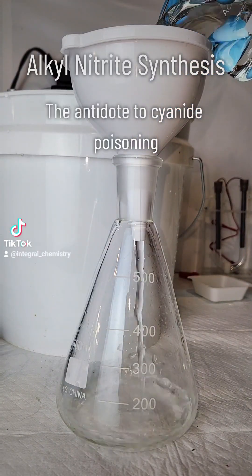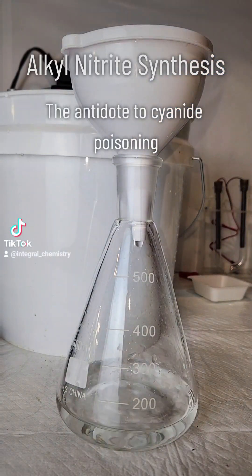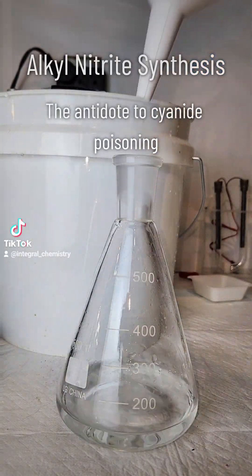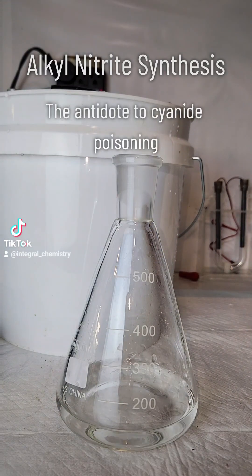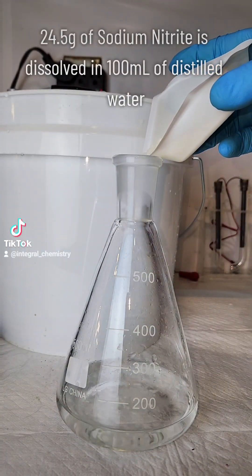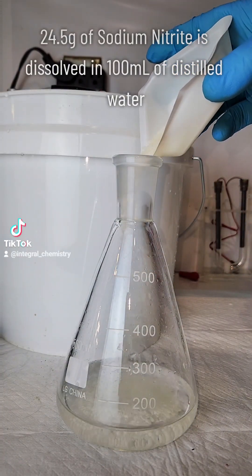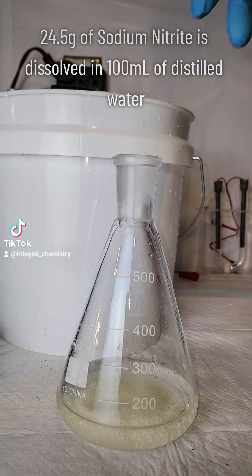I have some videos coming up that require me to work with cyanide gas, so today I'm going to demonstrate the synthesis of alkyl nitrites, which are a broad class of drugs that work as a very effective cyanide antidote.